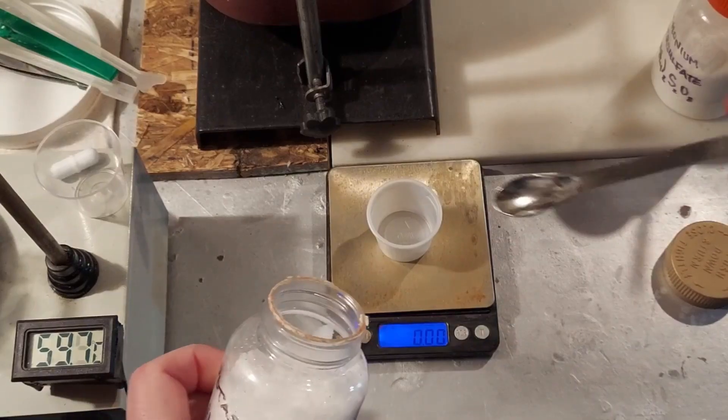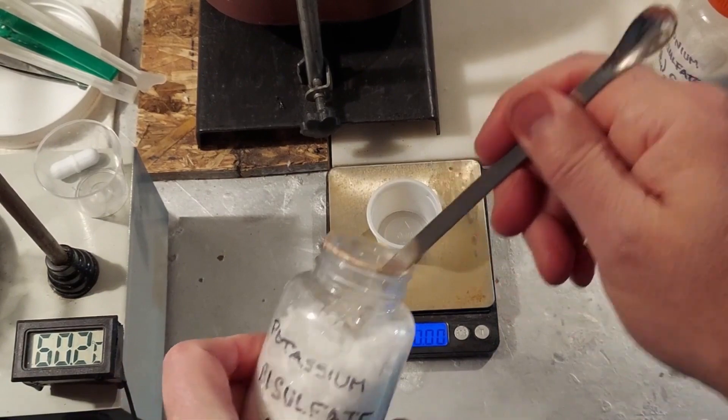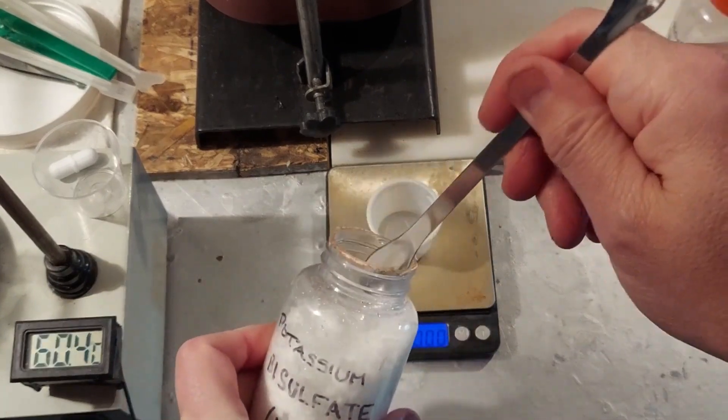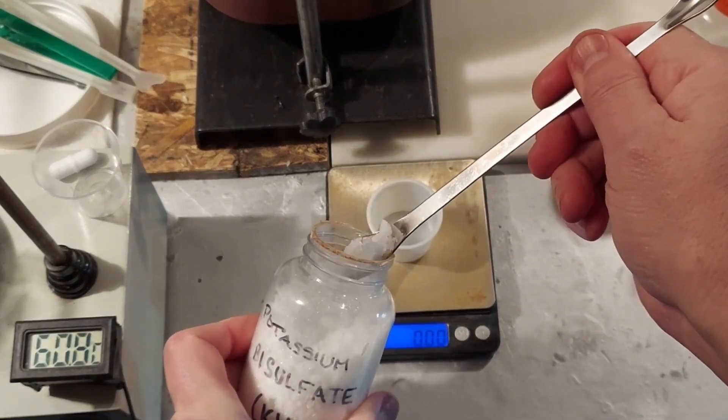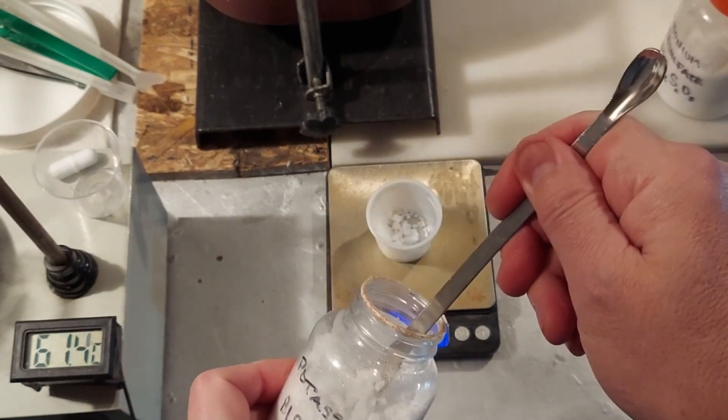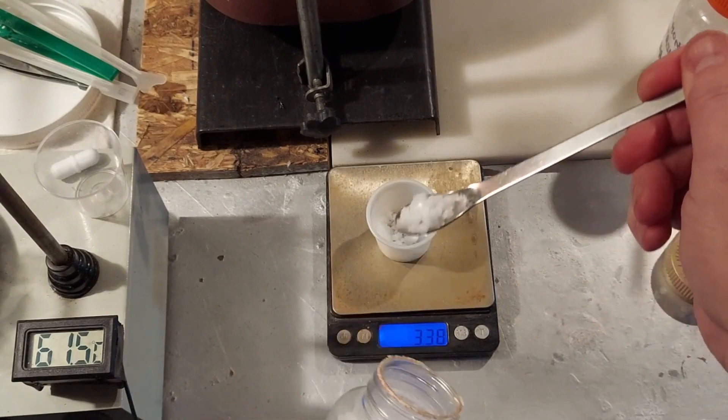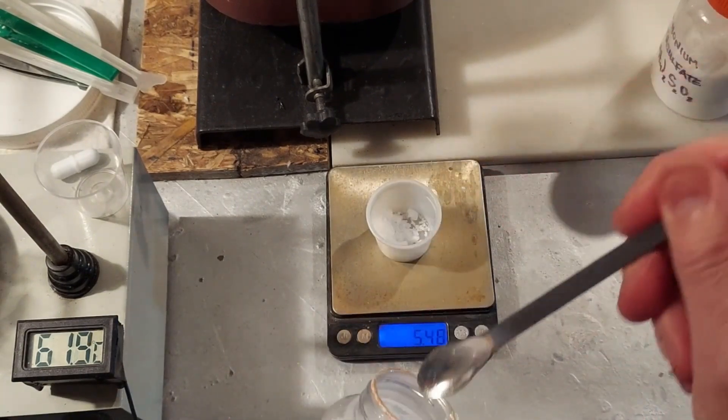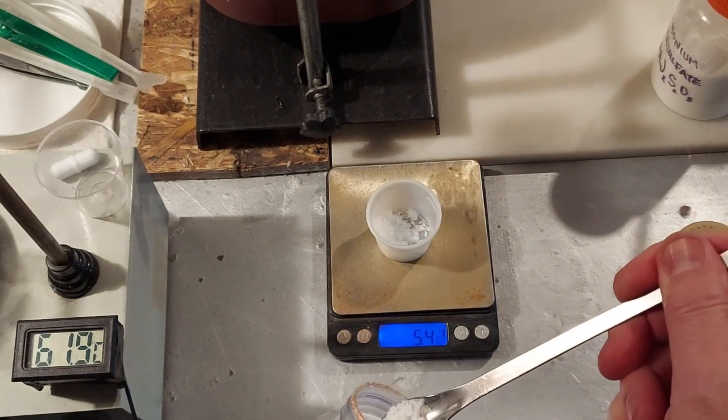While the ammonium persulfate is dissolving there, we're going to measure out our potassium bisulfate. And don't forget, this is a byproduct of making nitric acid when you use potassium nitrate and sulfuric acid. So don't throw it out. Save it. It can come in handy. All right, we want 12 grams here.